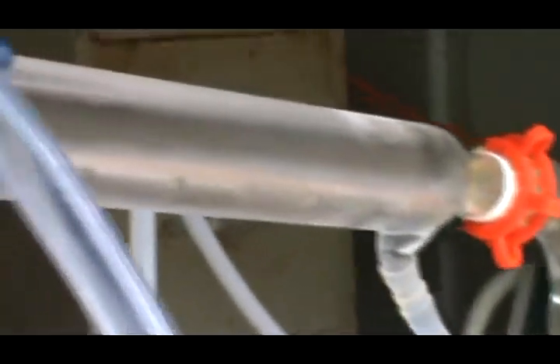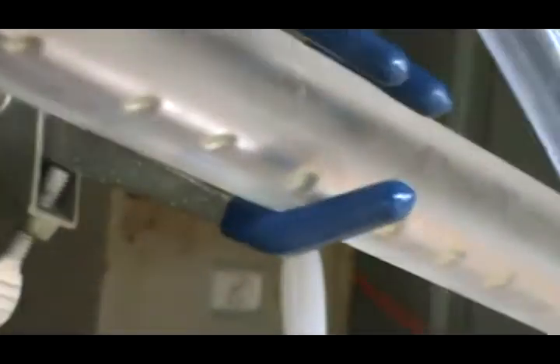I've got some nice big drops coming across, so you know that this thing is pretty efficient. If you've just got small little droplets, you should probably have a better condenser. But this one's doing a pretty good job. See the nice big drops? It's all condensed right in this beginning part, so you know it's doing pretty good.